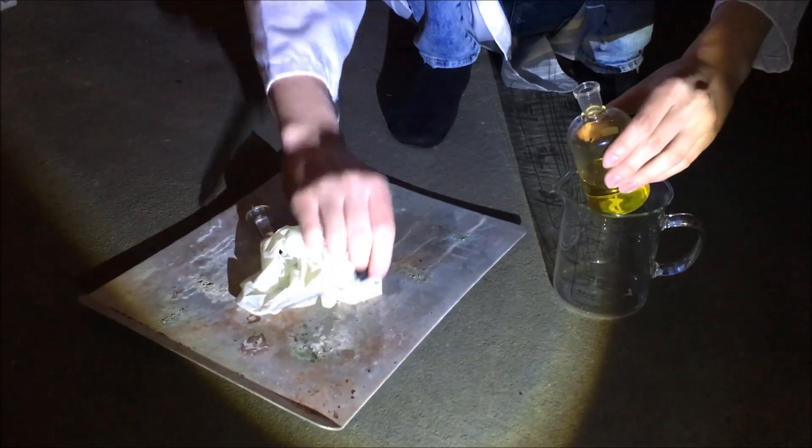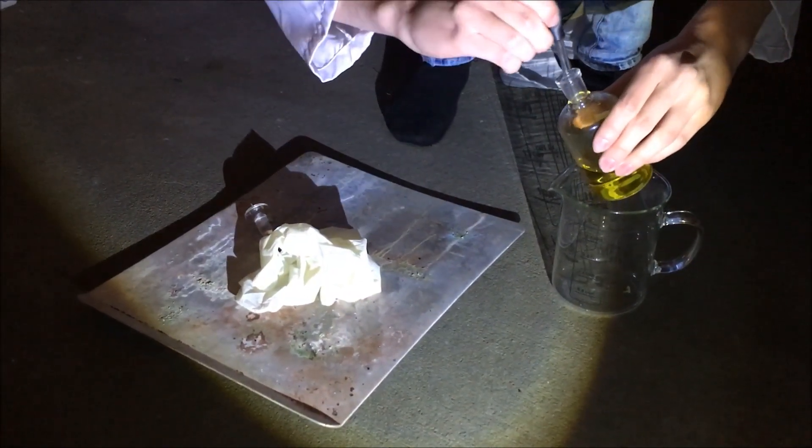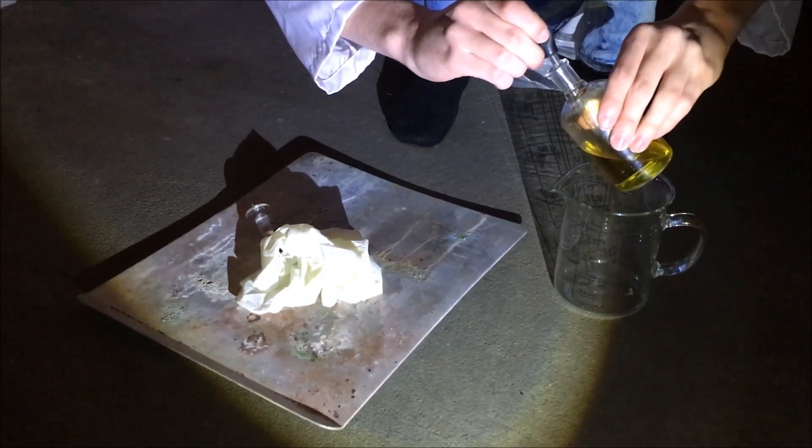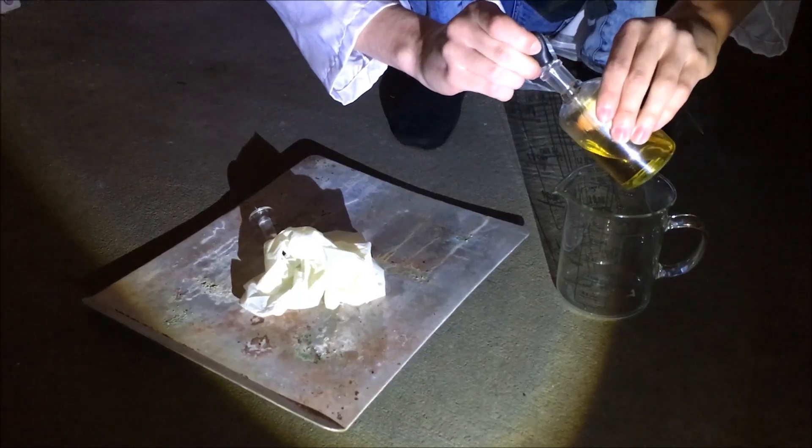While doing this, you do not want to wear gloves, because fuming nitric acid will light the gloves on fire, because it is a very strong oxidizer.